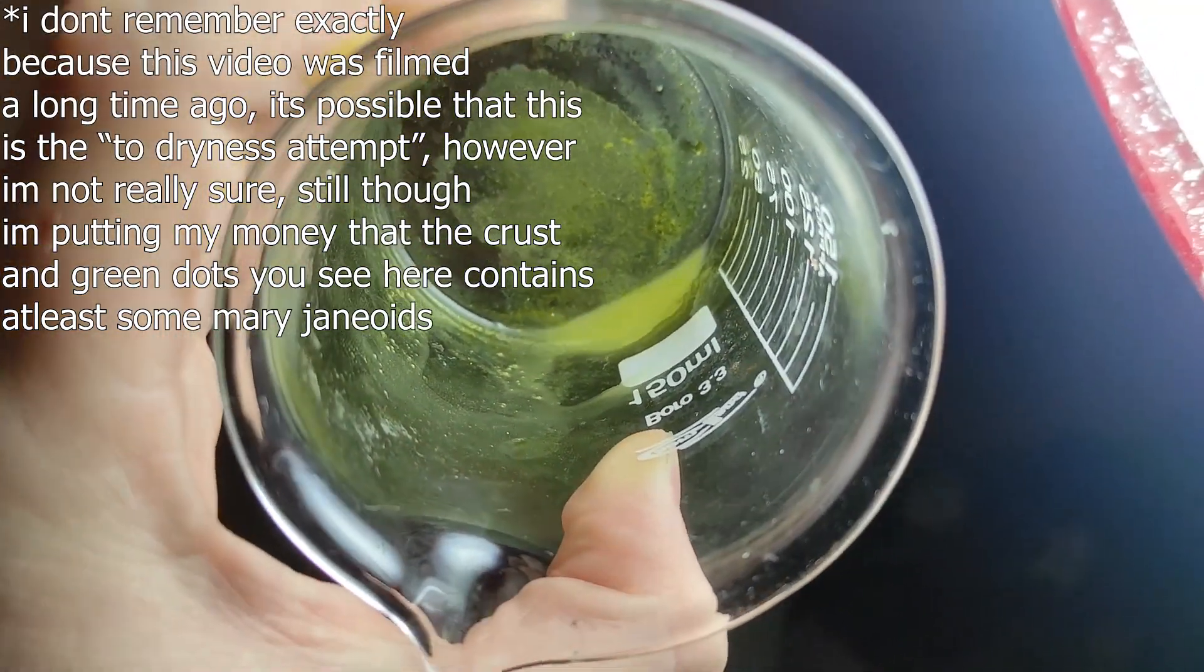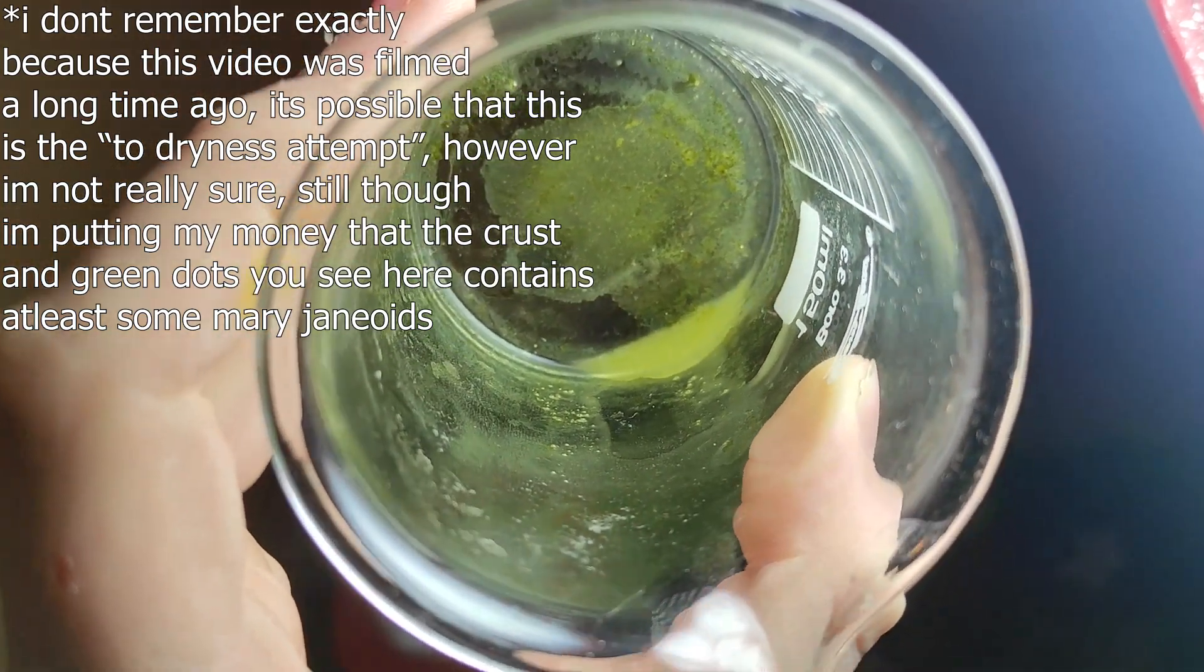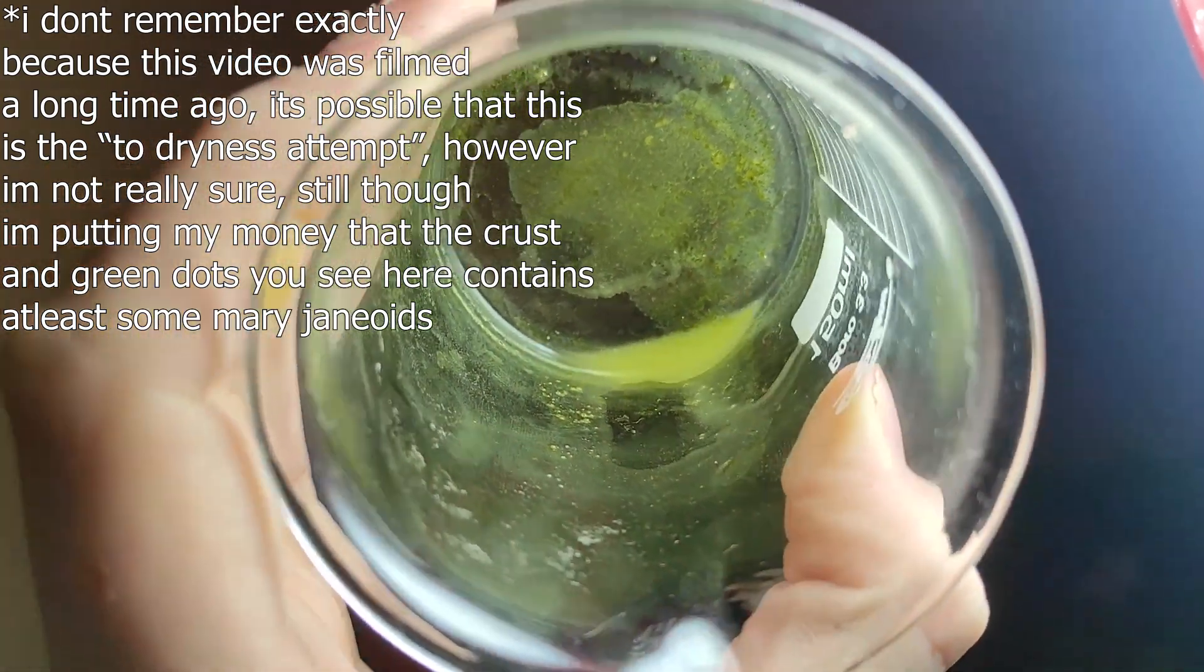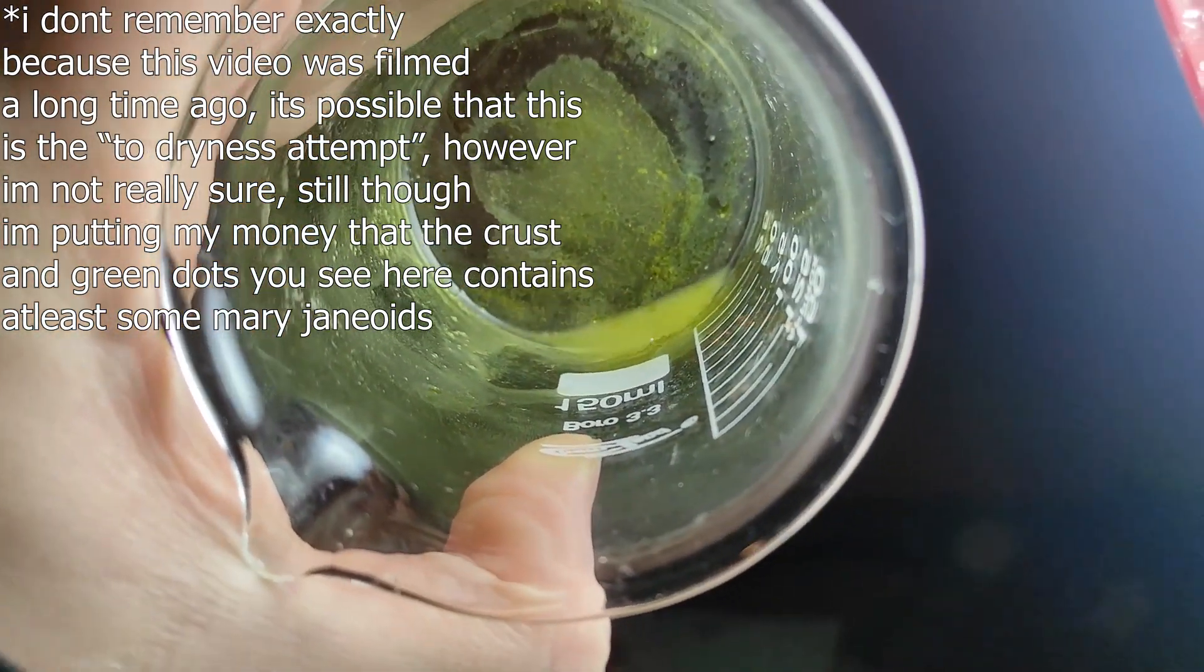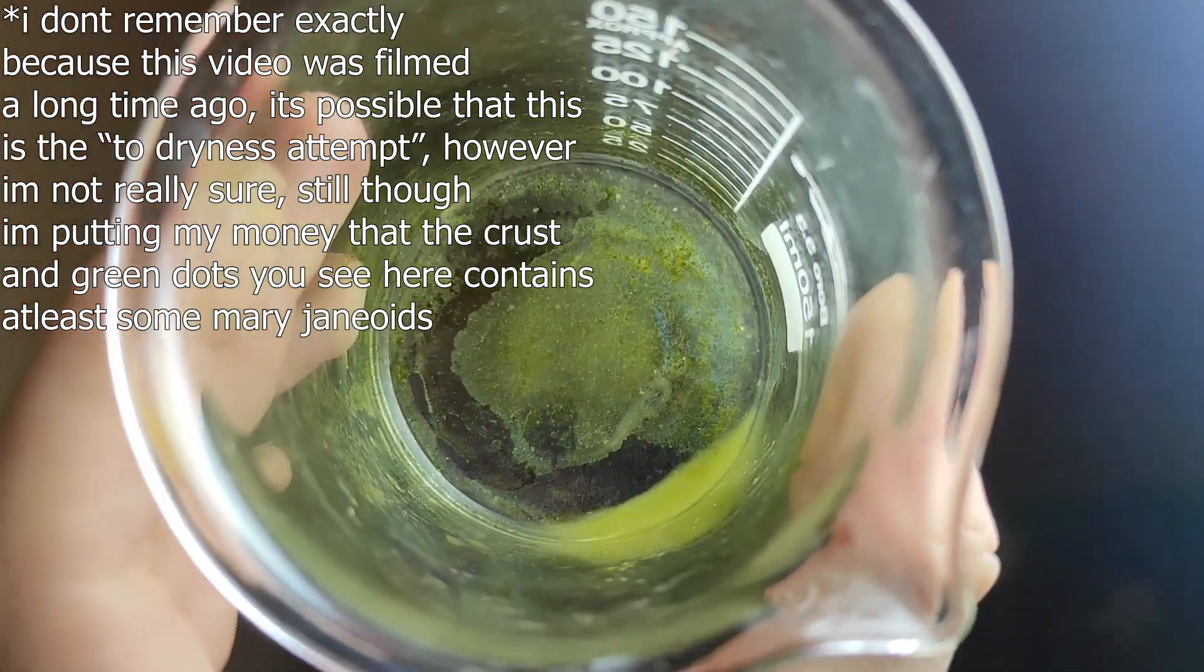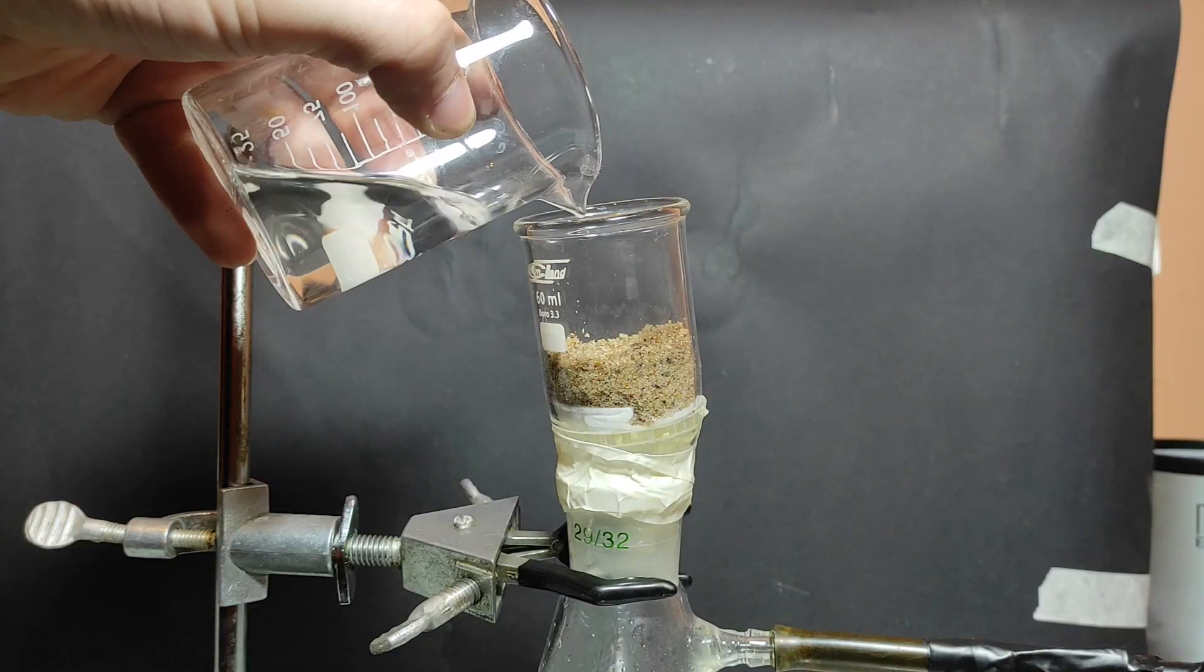I know this is a long shot, but after I finished filming I've tried heating it to dryness. However, there was barely anything left. So it's possible that CBD is either the crust on the walls of the beaker, but just heavily colored or most of it is still in the sand.